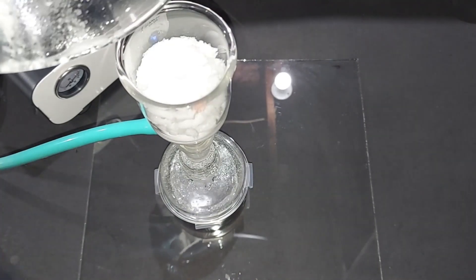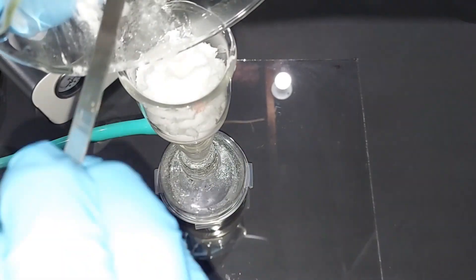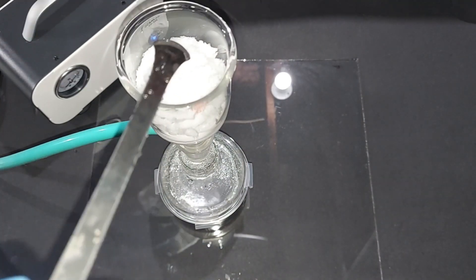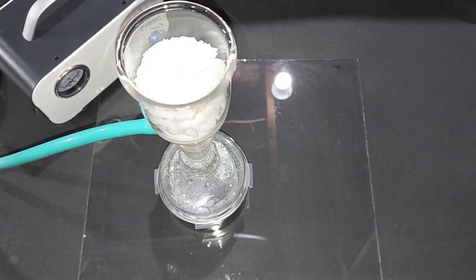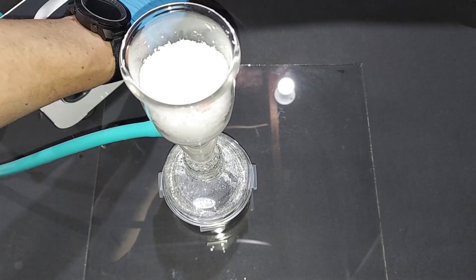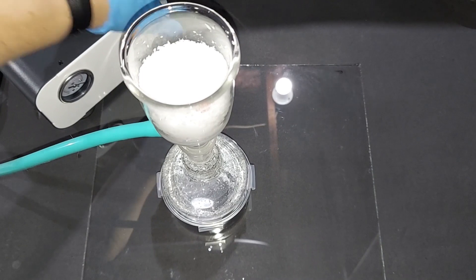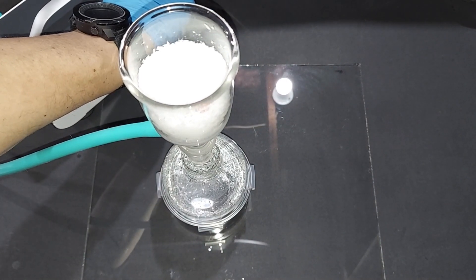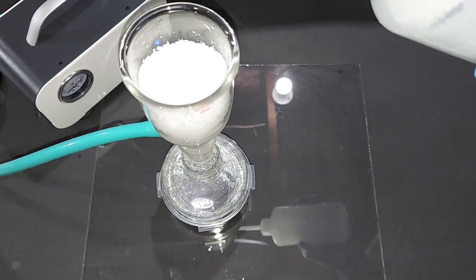Okay, I'm literally putting the last bit in here. And I will be back when it's done pulling all the liquid through it can. It's done, and I'm going to turn this off and get my cold distilled water. We're doing this, of course, to remove any loose reagents that may still be in here.